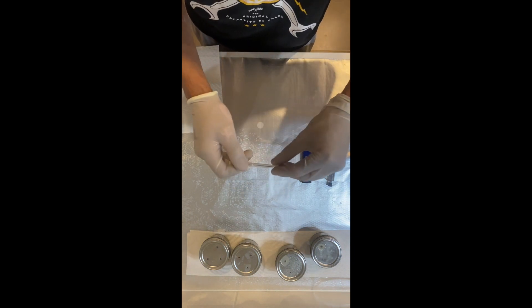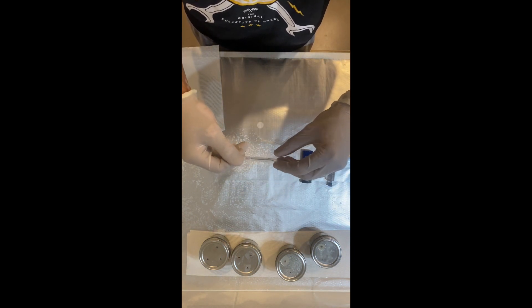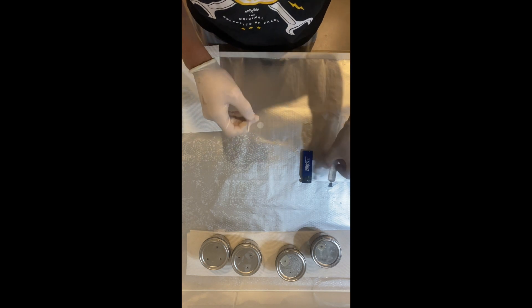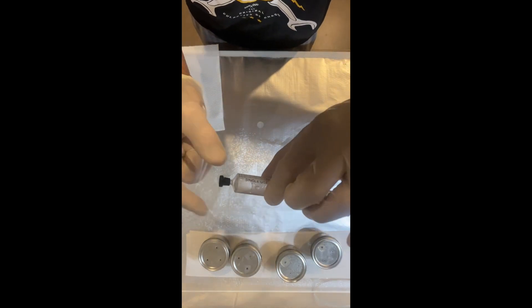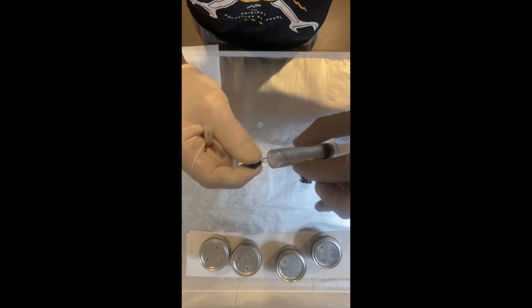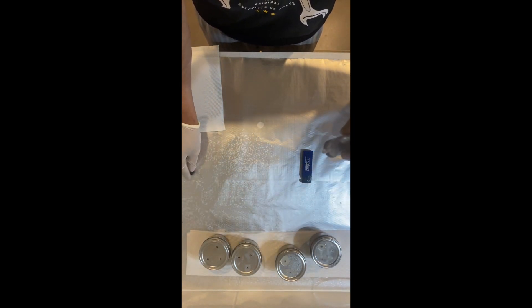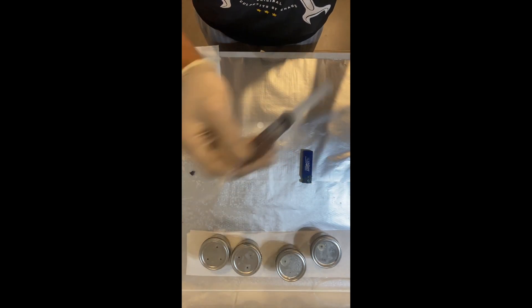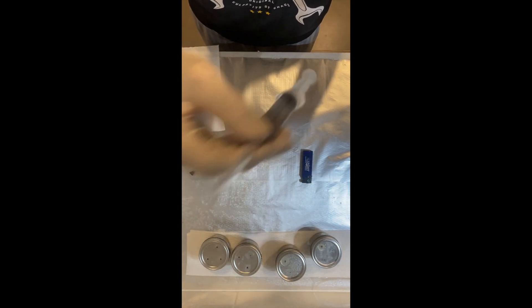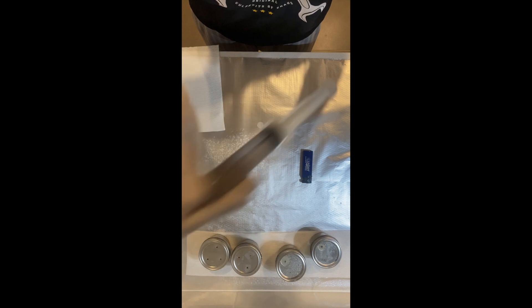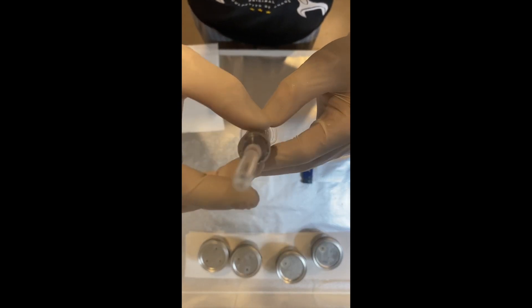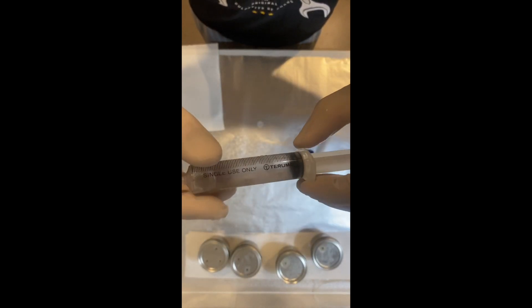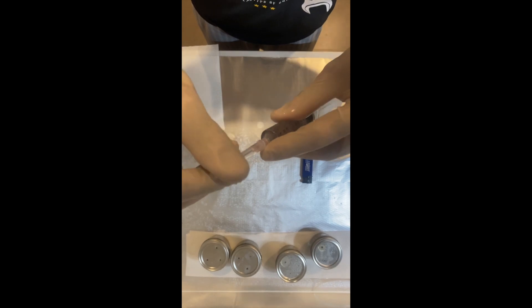Okay guys, the flame sterilization now. We have our needle tip. We have our spore syringe with our rubber cap, which we're going to pop off, put to the side, needle tip on. We're just going to give it one last shake because I can see a clump in there. That should do it.